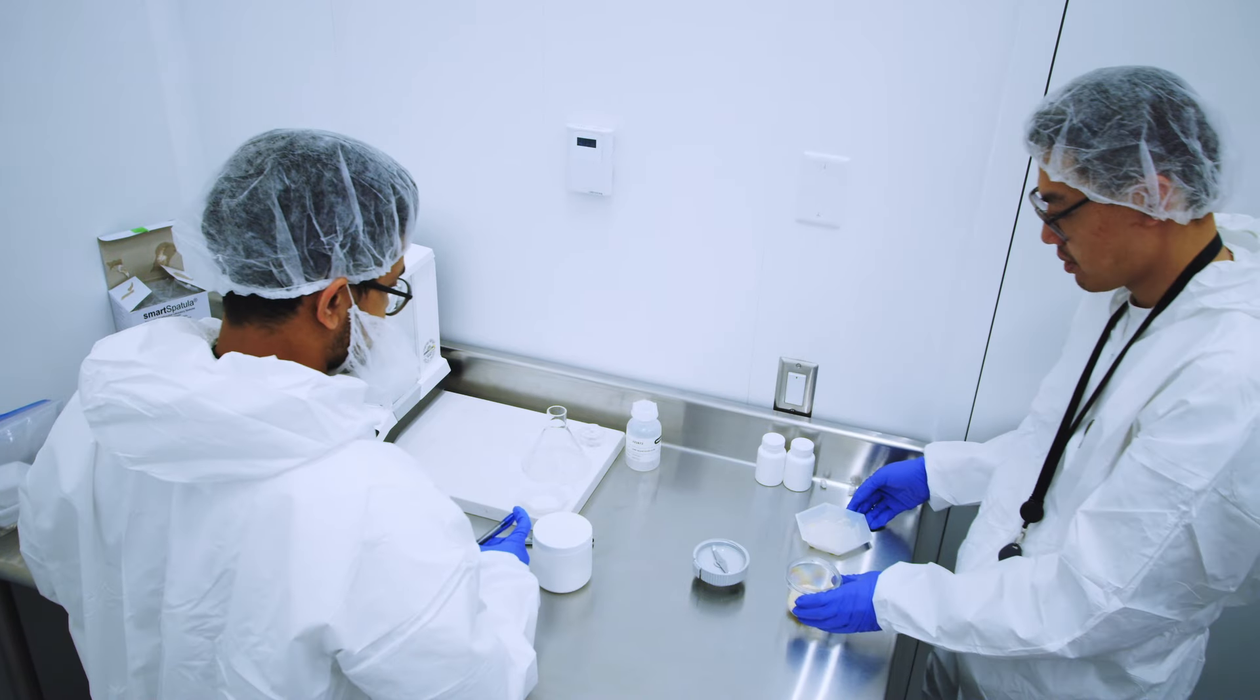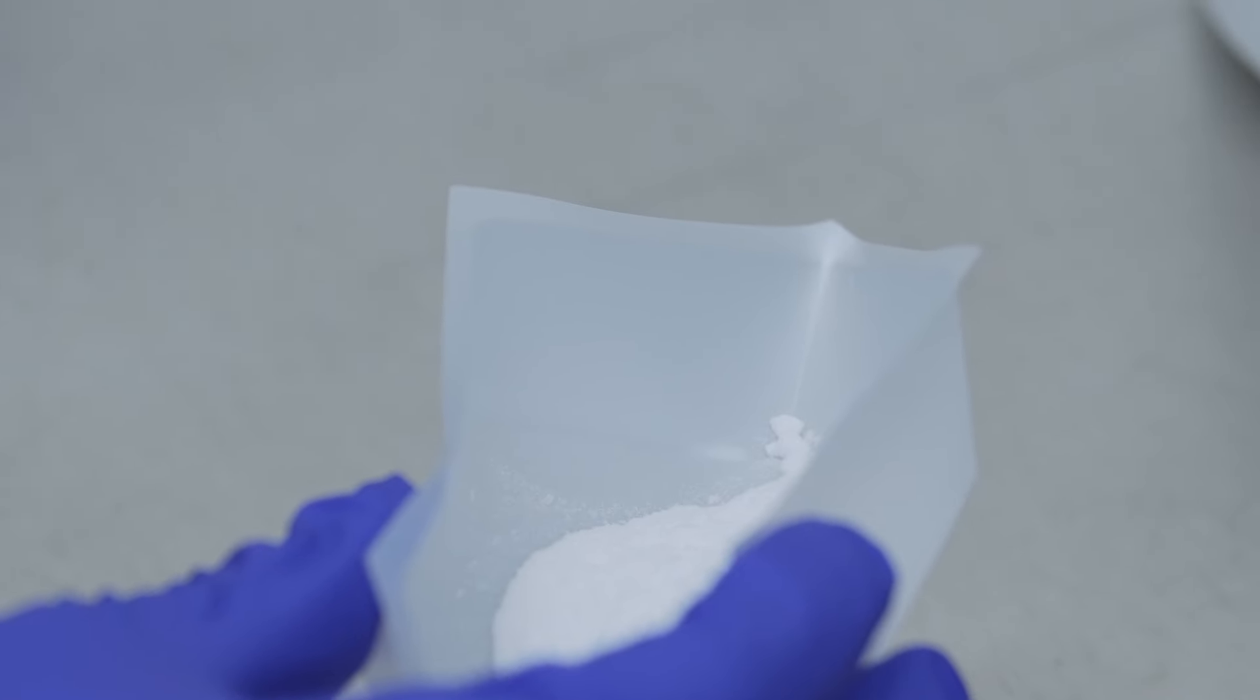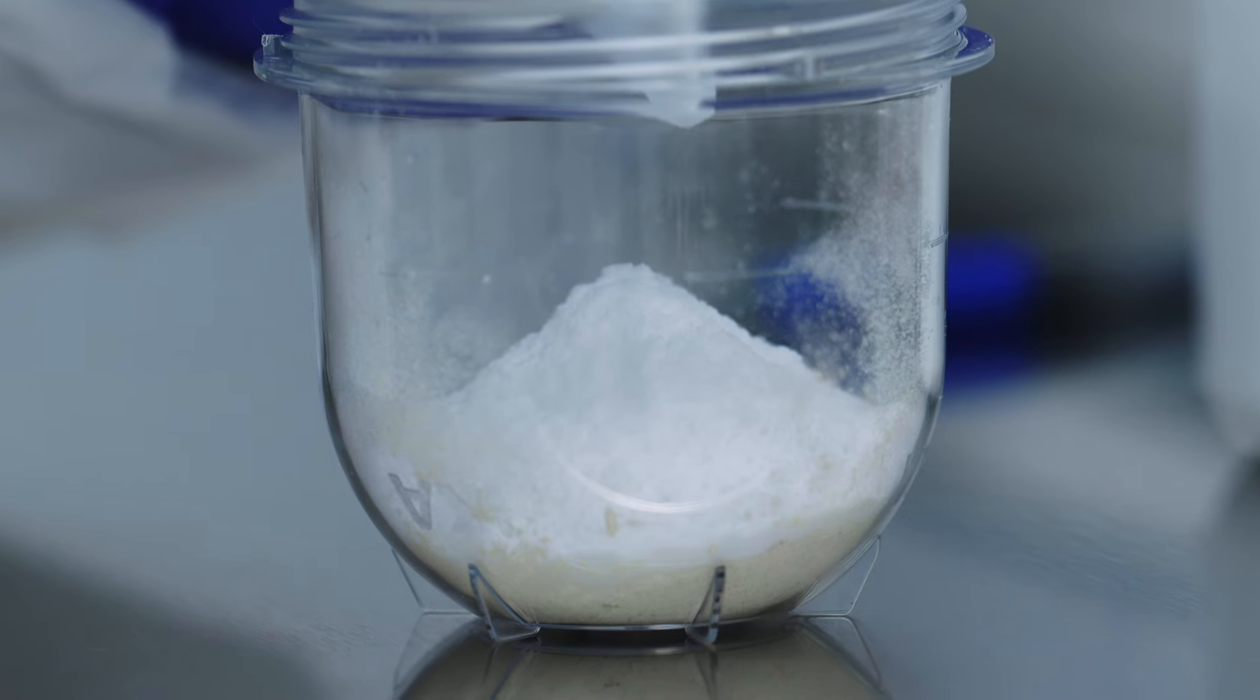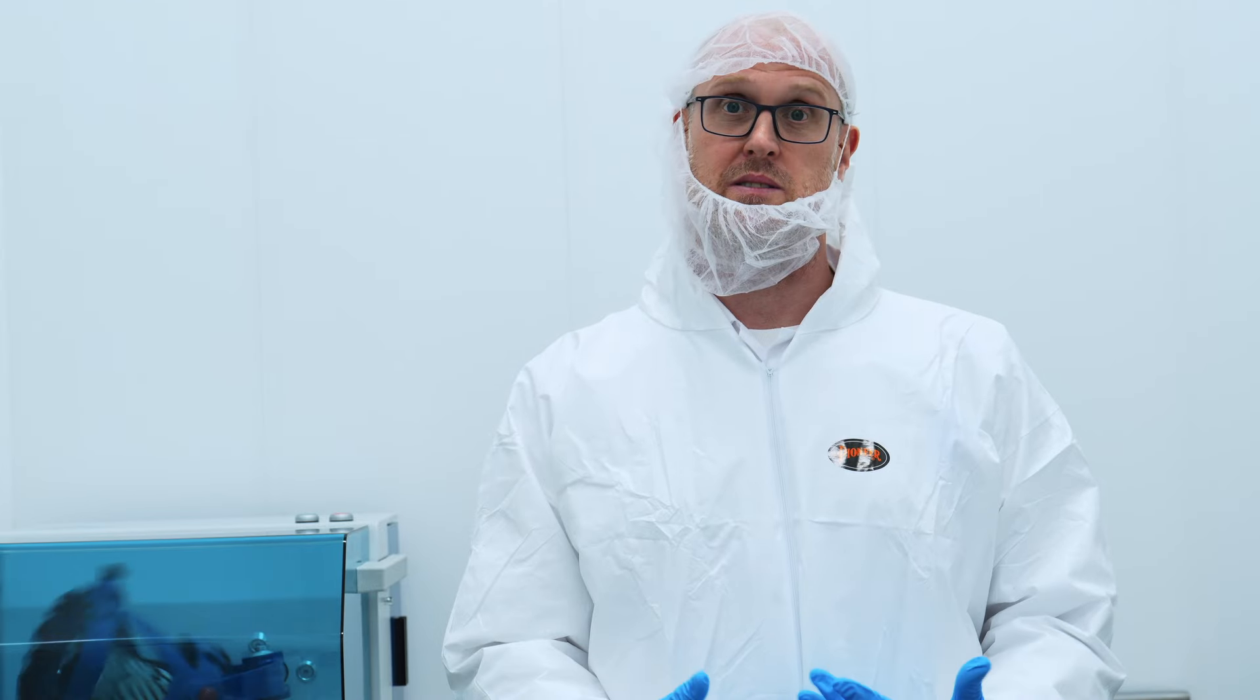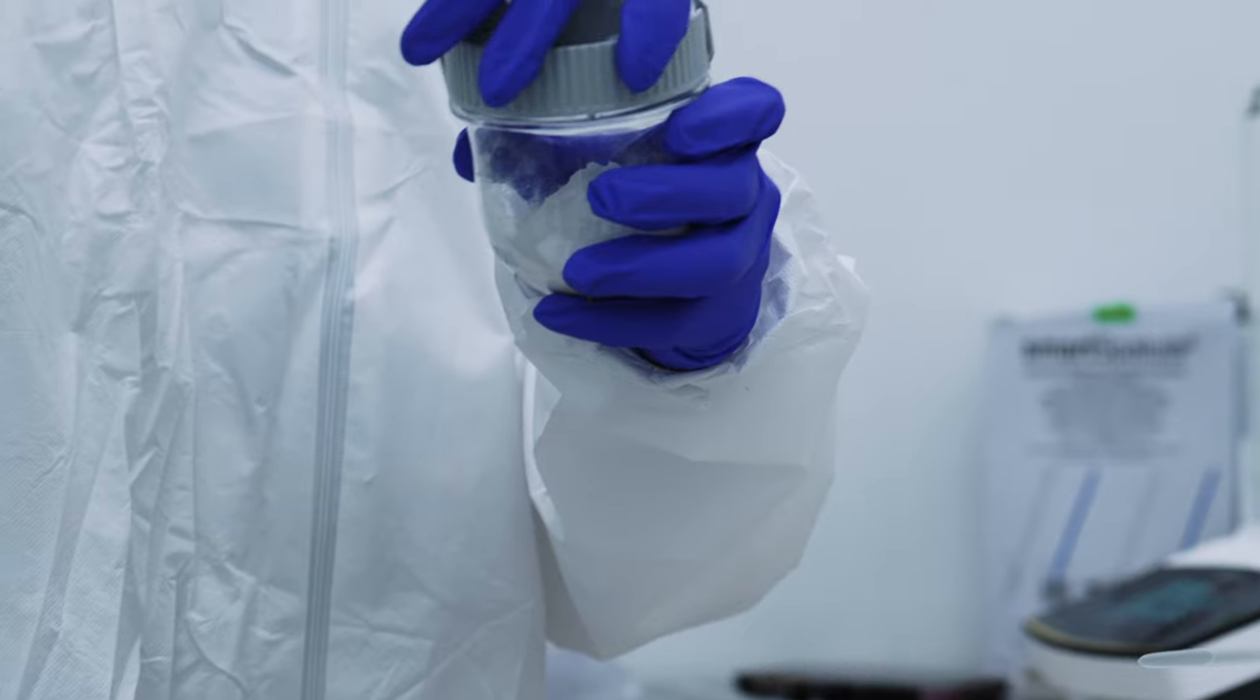Here we are in our GMP formulation room. This is where we take all of the active pharmaceutical ingredients, right now being the MDMA. The formulation process is basically we mix the API with a material called an excipient. It's another powder that will dilute the material so that when we fill the capsules, we are filling the entirety of the capsule. When we're combining these, we need to make sure that it's very homogeneous.